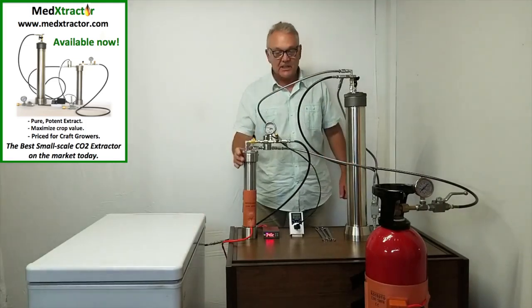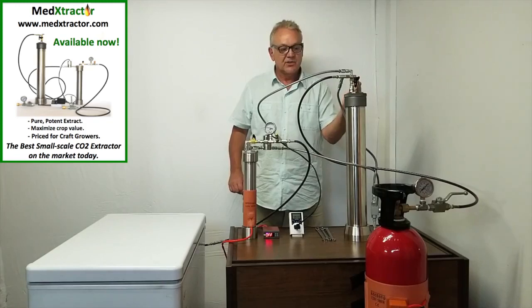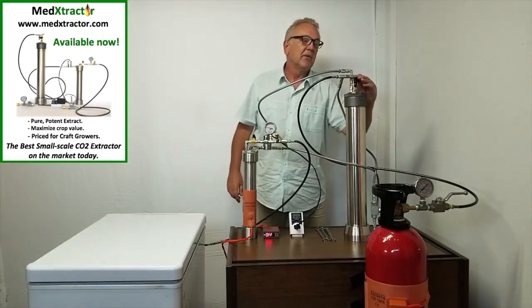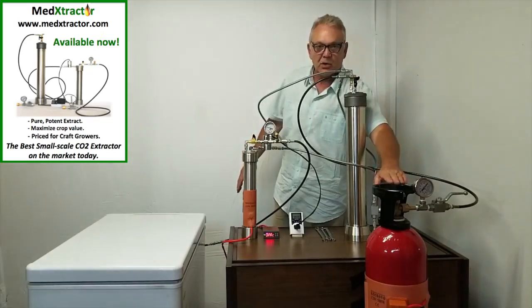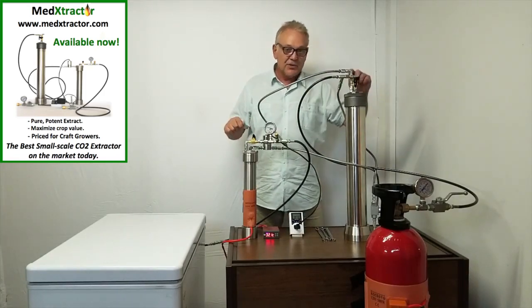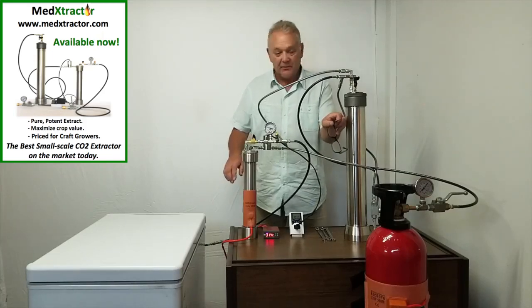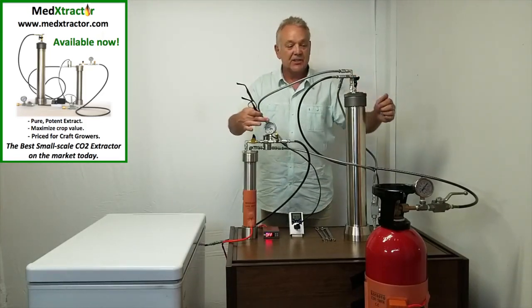We want to shut off the collector valve and open the cheater valve to allow the CO2 to come from this tank directly into here, run right across the top of the chamber and out here, bypassing the extractor and going into the tank in the freezer. This is a direct transfer going on right now. Because this tank is much warmer than the tank in the freezer, the CO2 will flow. There will still be probably three or four pounds of CO2 in there that you want to transfer. You just turn this valve open and let it run until the pressure gauges equalize.